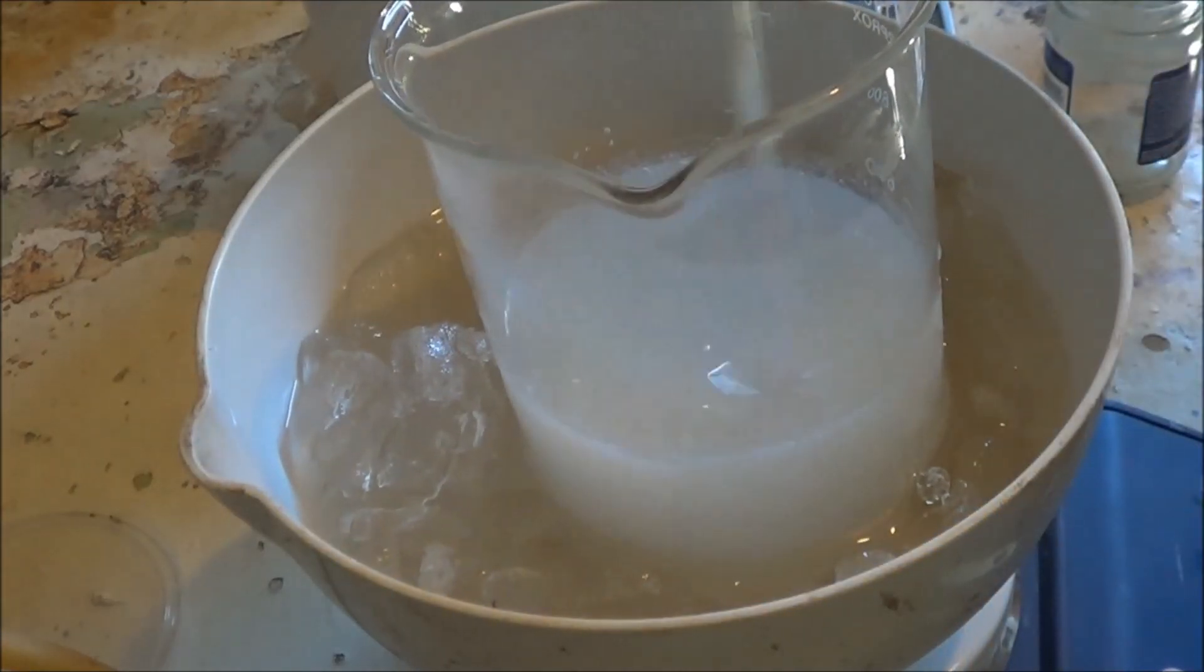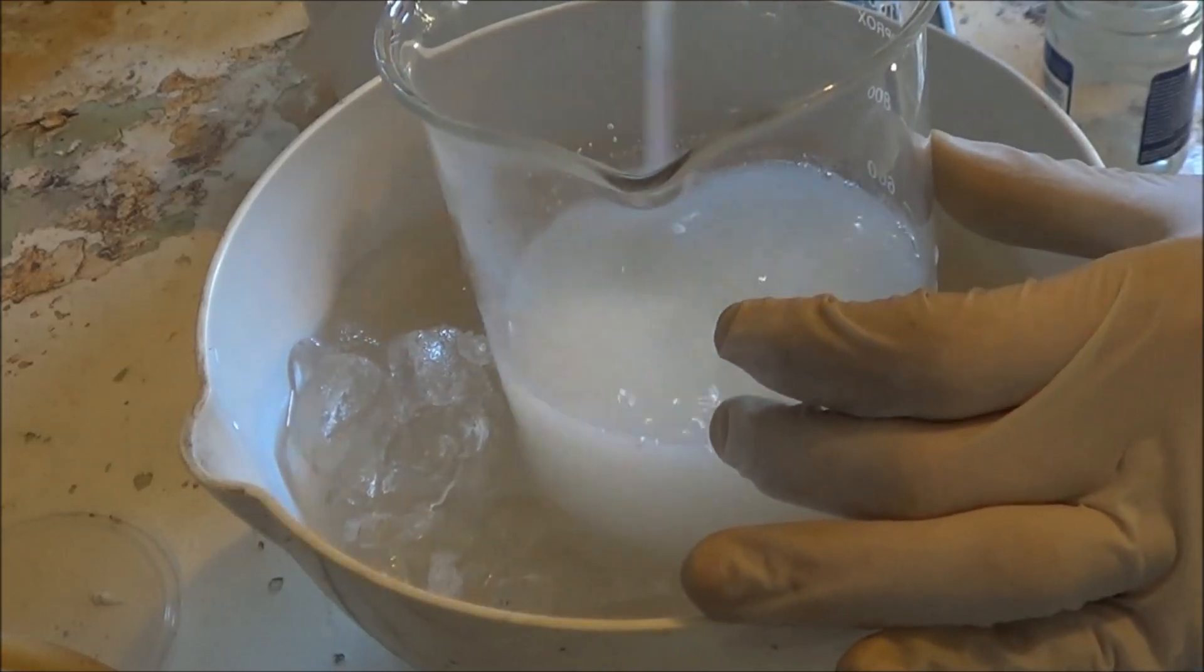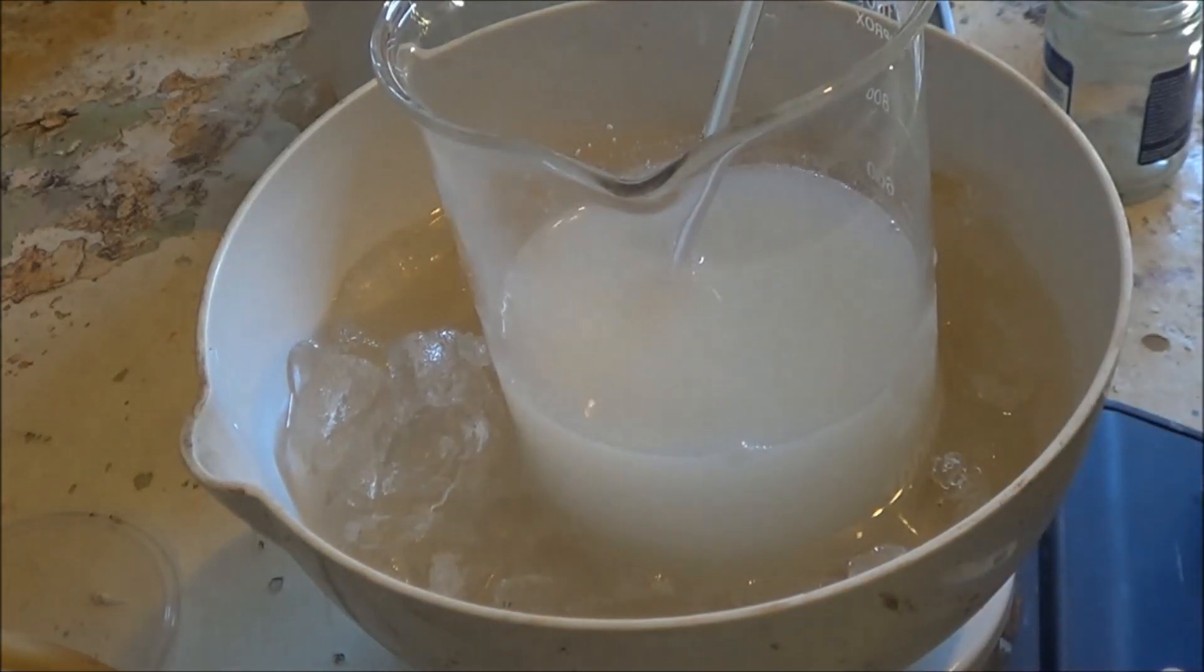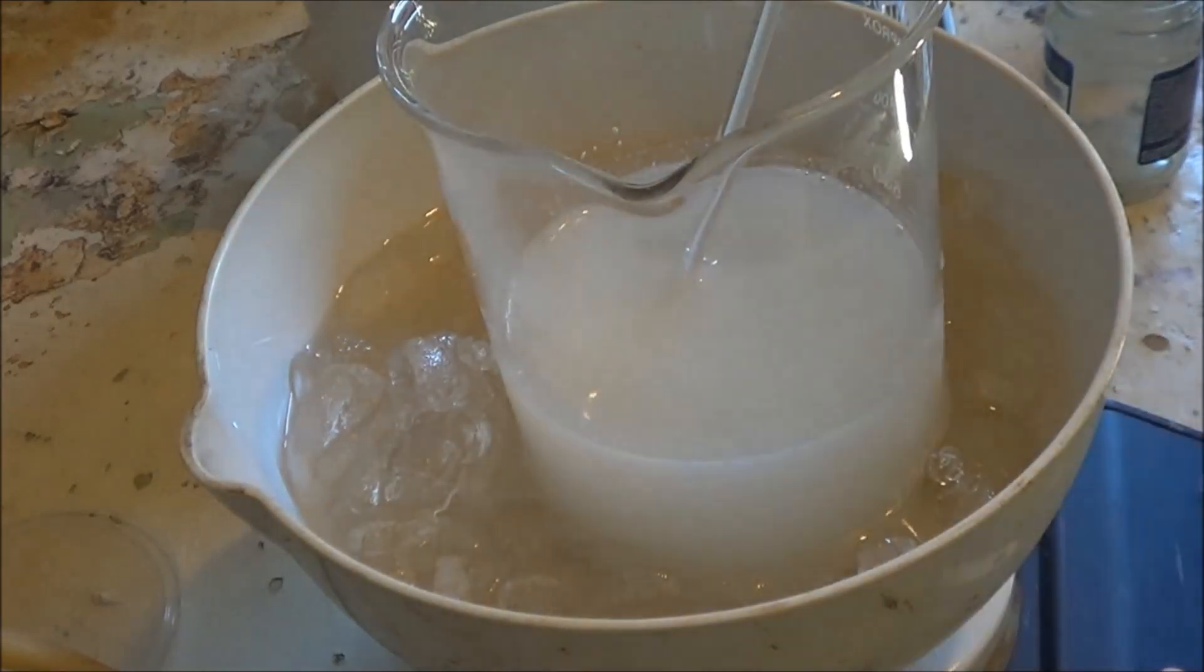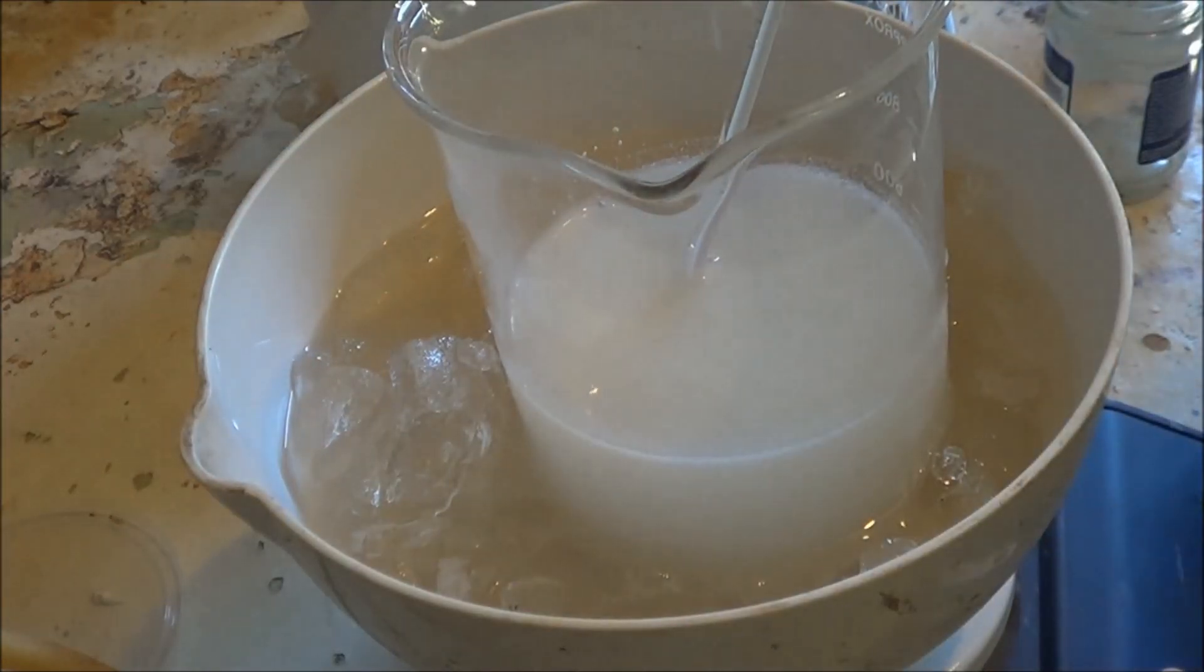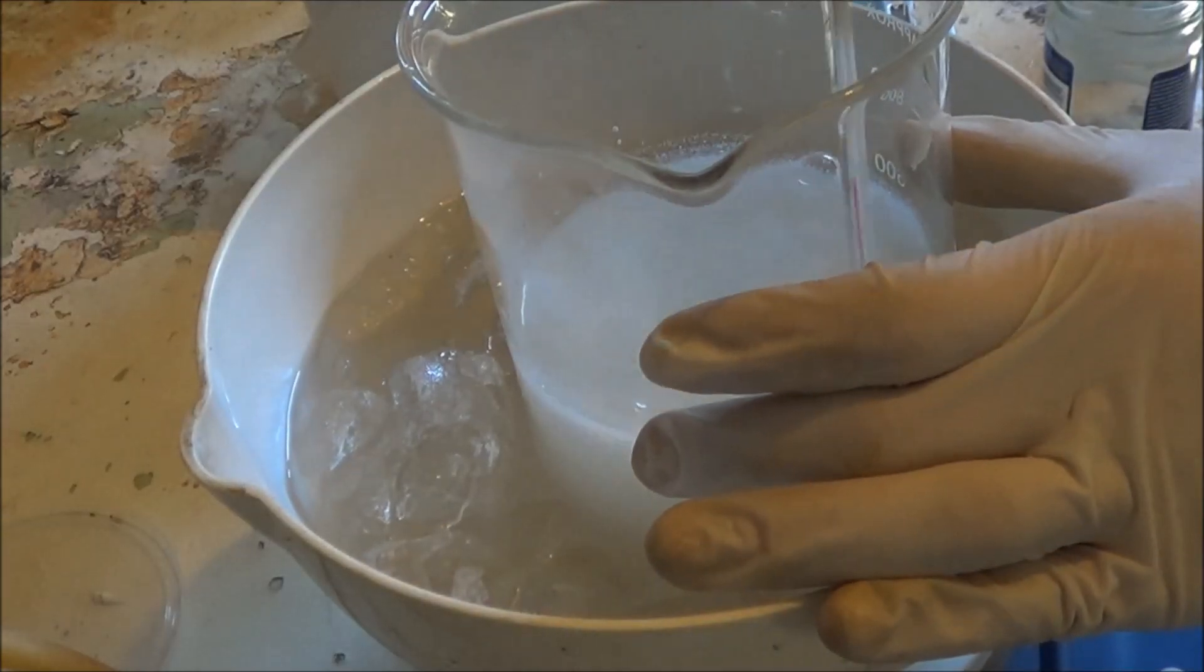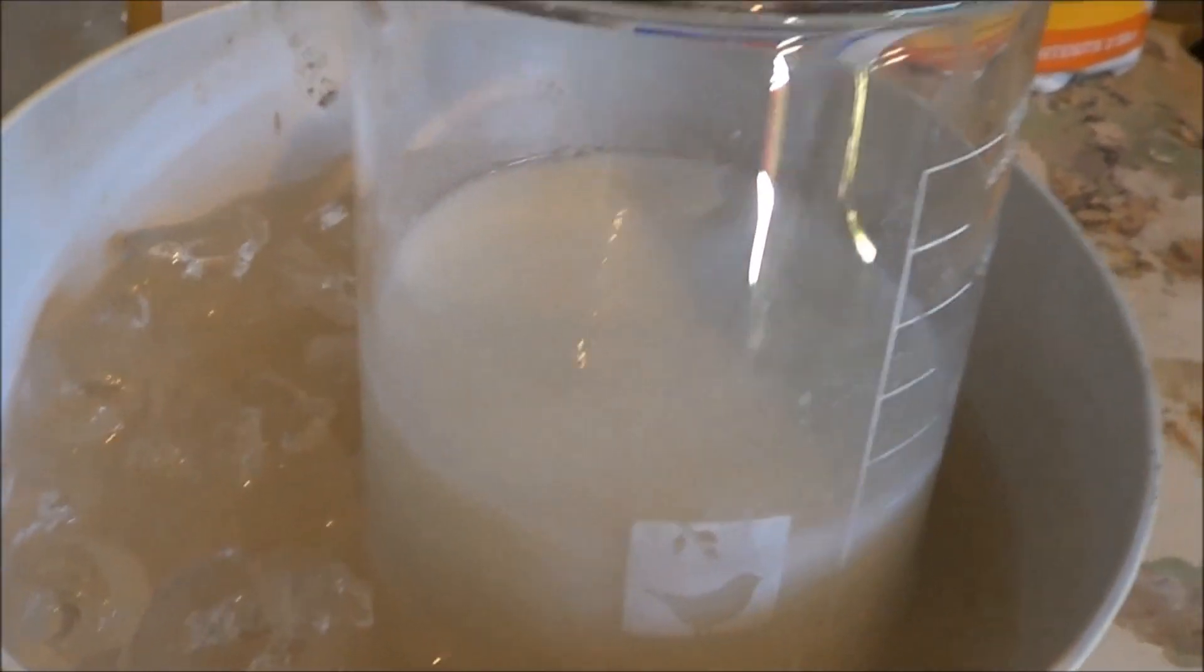My stir bar's got stuck because of all the precipitate here. I might just chuck another stir bar in there. I don't know if that's a good idea. Does that help? Not really. Well, three stir bars. I'm pretty sure that's the maximum amount of stir bars I'm allowed to put in a solution. Any more than that, it's illegal.